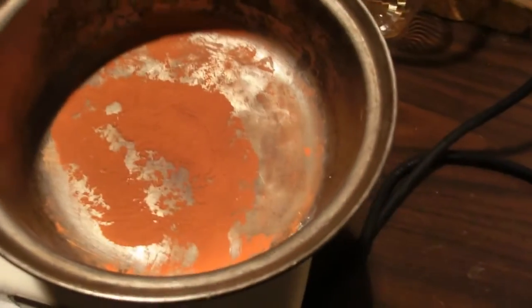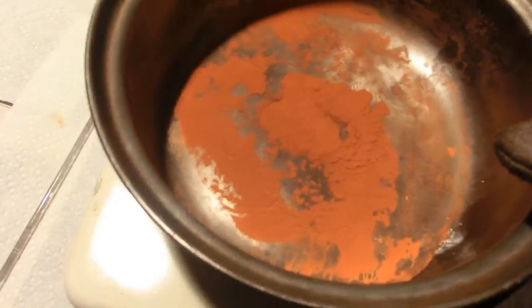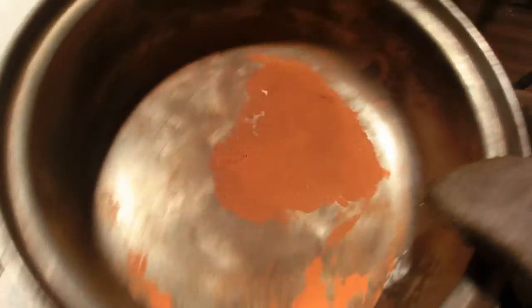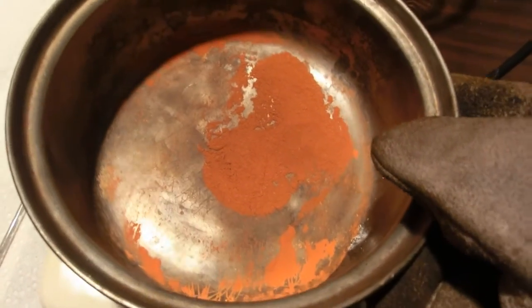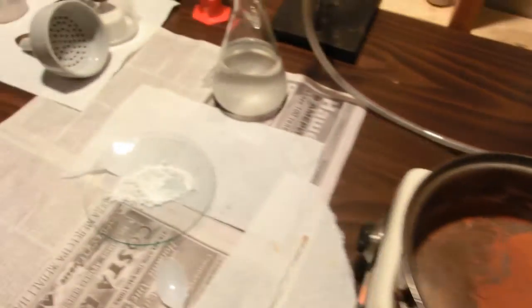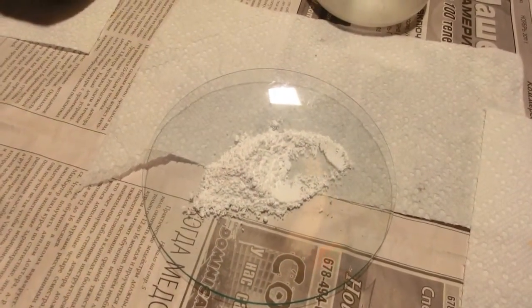I'll keep on heating until I get a uniform color. As you can see that the color has become much more uniform. I think I'm about ready to take this off. I think this batch is done. I'm gonna put the rest of this after I take that off in there and convert that.